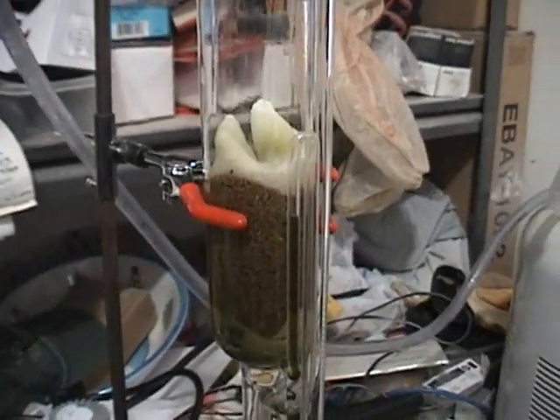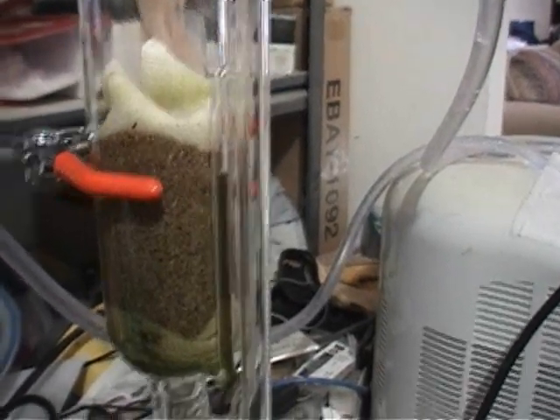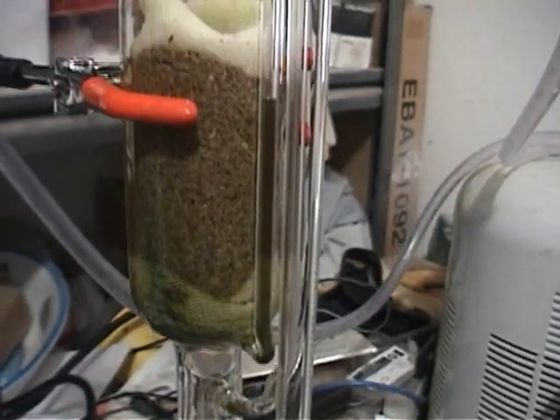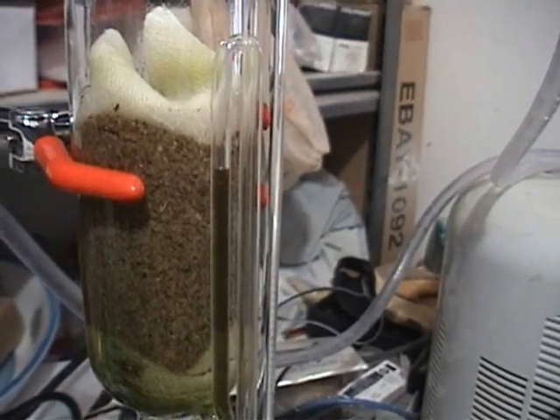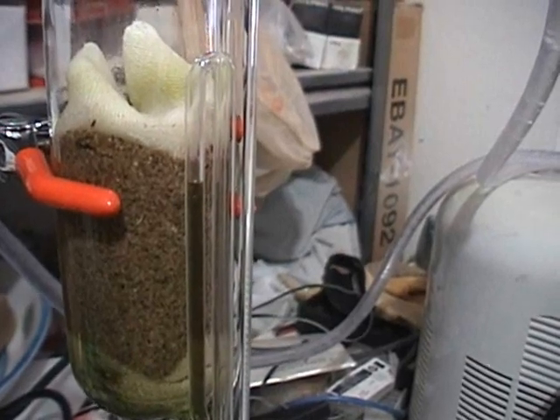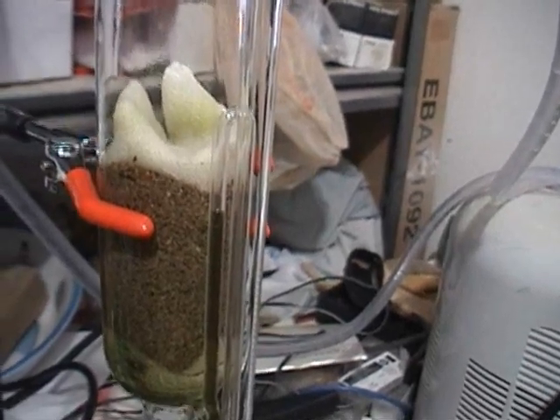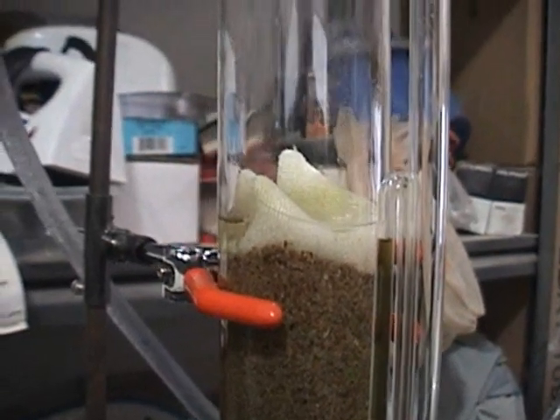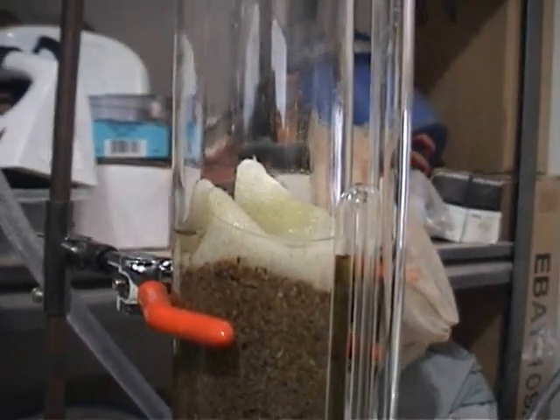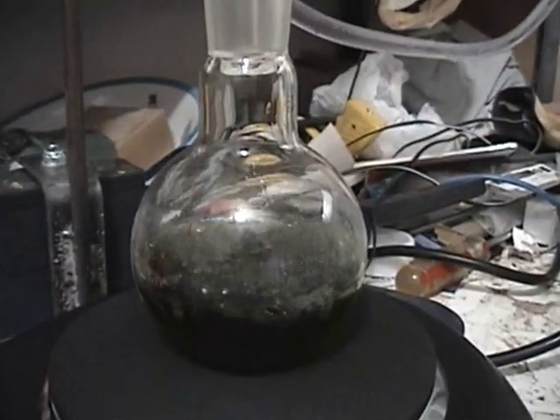There's the ice machine — I put a soda in there to get it nice and cold. It's getting ready to dump. The level is getting higher, which indicates how much liquid is in it, and the green has decreased in intensity. This is about the third or fourth dump. I think it'll dump sooner now — I can cycle it about every half hour and get a real good extraction. You can see it's filling up with clear liquid there in the extraction chamber. Pretty fast drip rate and pretty good boiling rate.